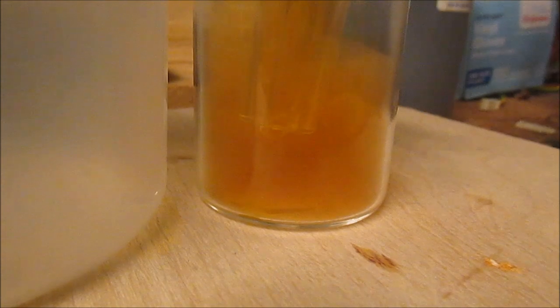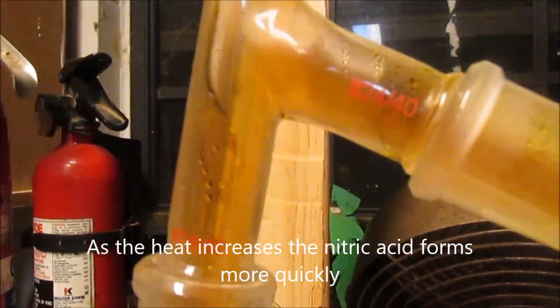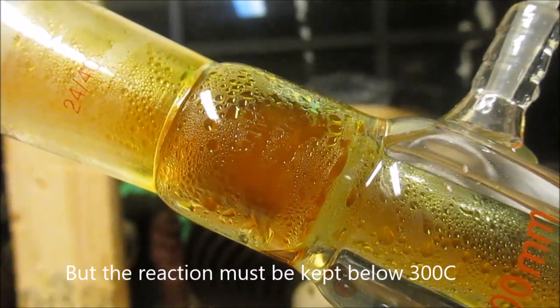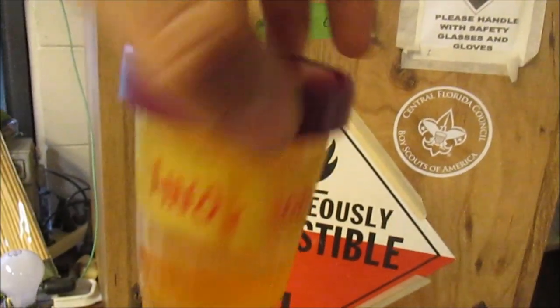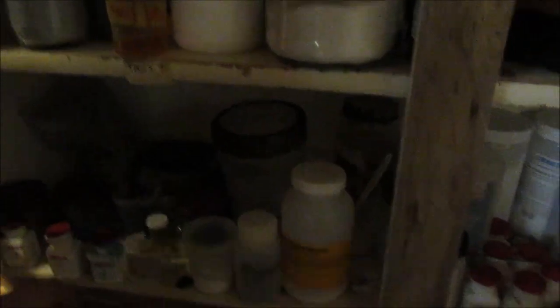Now we're putting the heat on — it's getting hot. We're getting our first drops of pure nitric acid. It's forming droplets really quickly. So after a few hours of distillation, we were able to produce quite a bit of red fuming nitric acid. This is supposed to be 100% pure — obviously it's not — but there is almost no water in there. That liquid is almost entirely acid. As you can see by the bulge in this lid, it's actually quite pressurized. We were able to get something like a 70% yield out of this, so there wasn't a whole lot of loss.